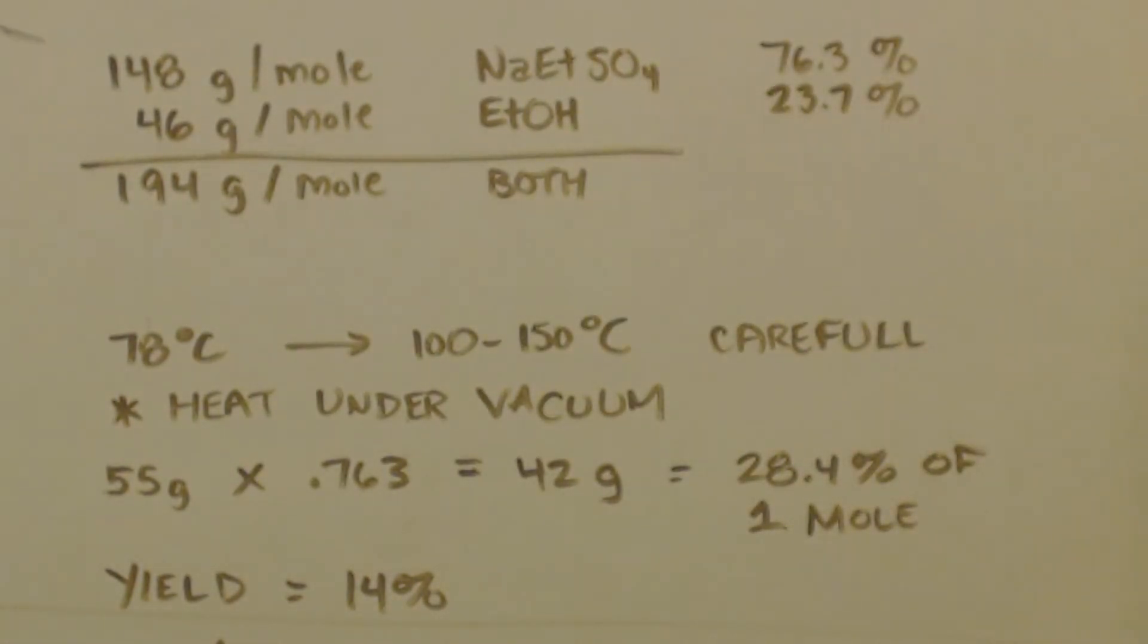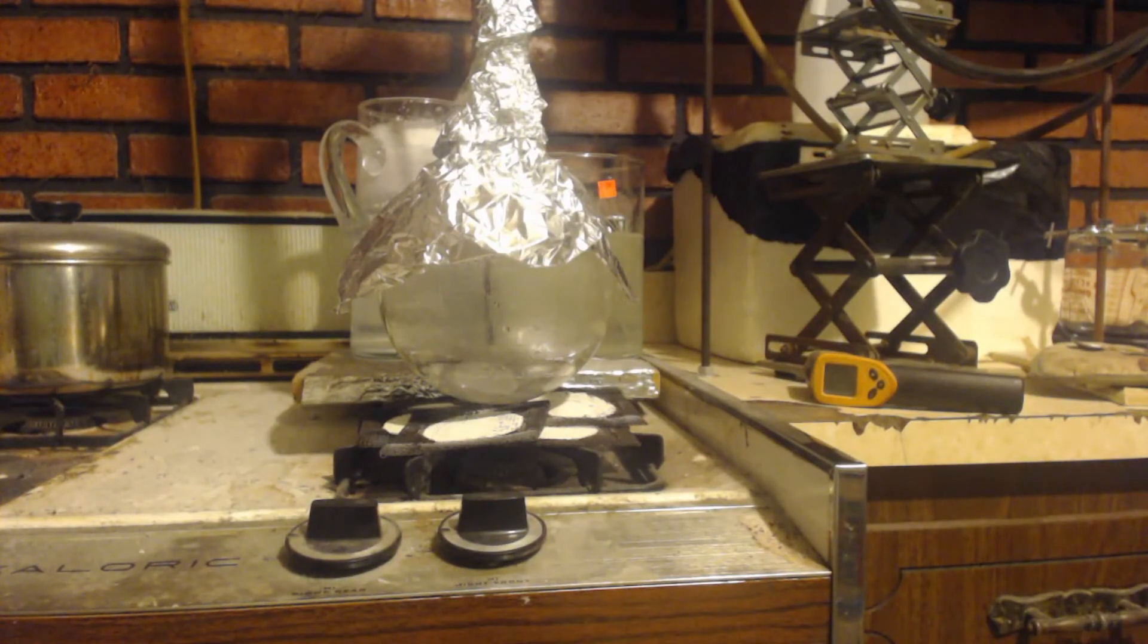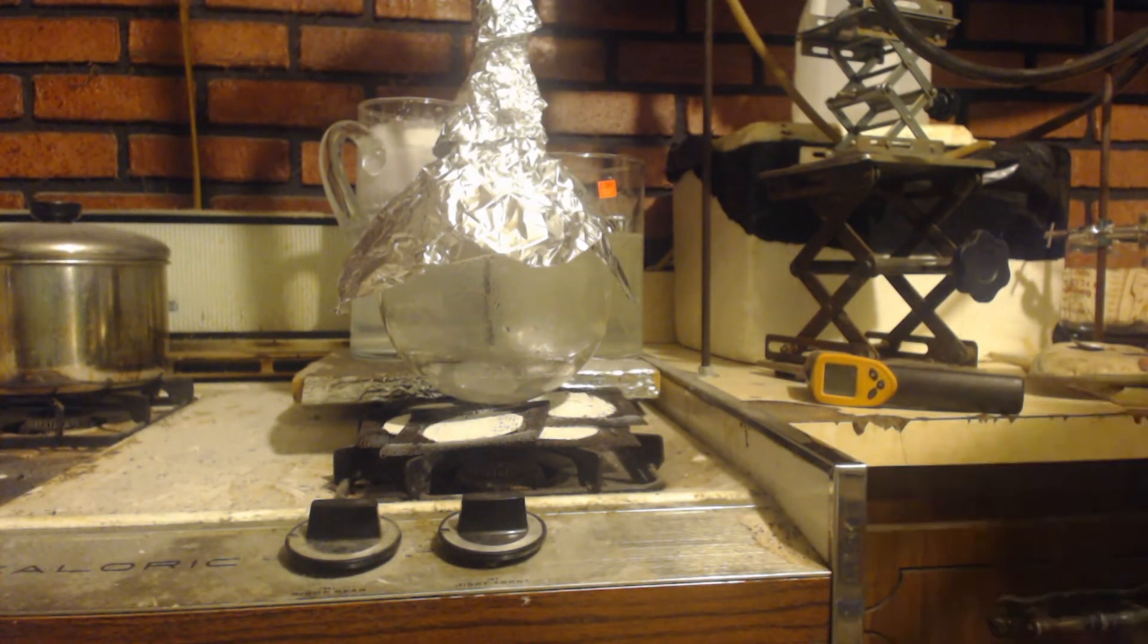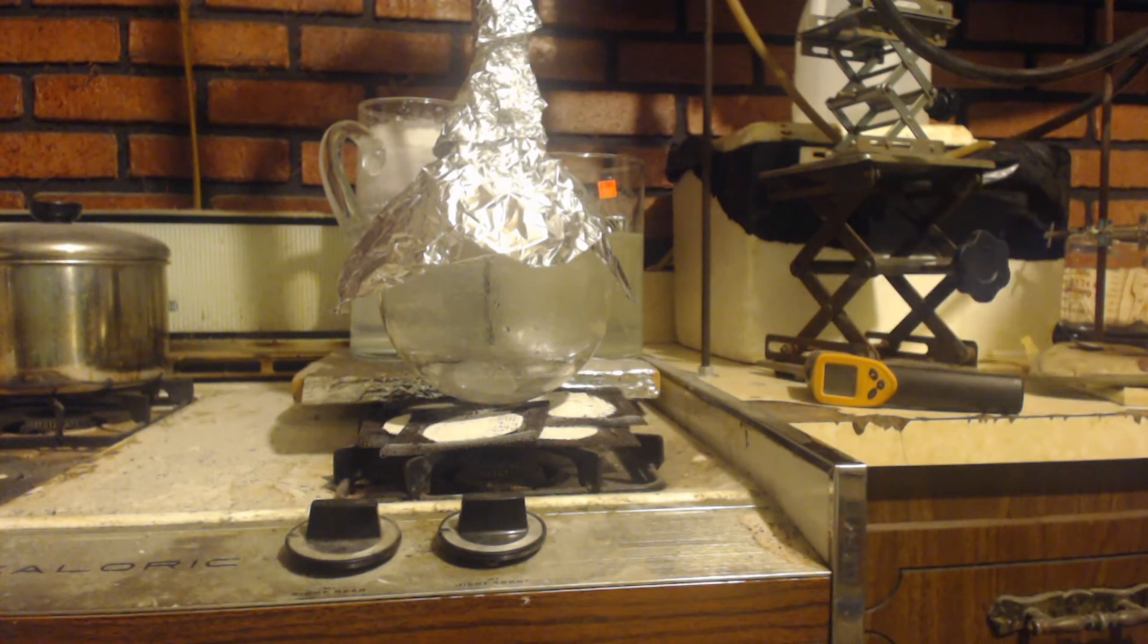But if you don't start with anhydrous chemicals in the beginning, like I did not, okay, I used the sulfuric acid straight out of the bottle. I only used as-is ethanol. I didn't dry it out completely. And I didn't remove the water. The very first step where we added ethanol and sulfuric acid together to make ethyl sulfuric acid, we had to reflux it. And when I refluxed it, I didn't remove any of the water like you're supposed to do when you're doing a Fischer esterification.